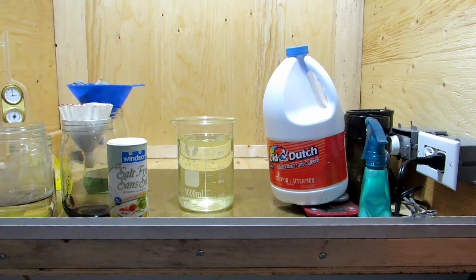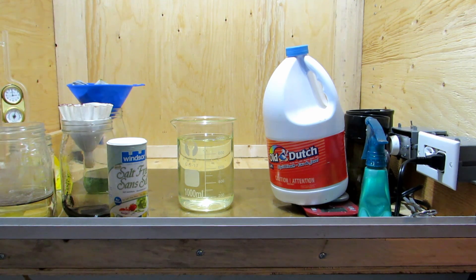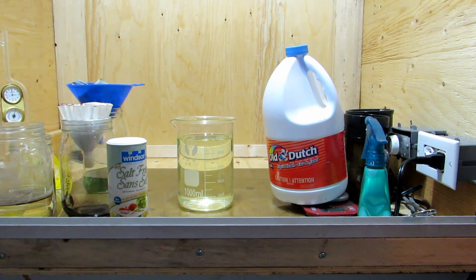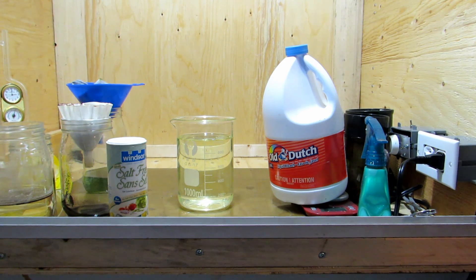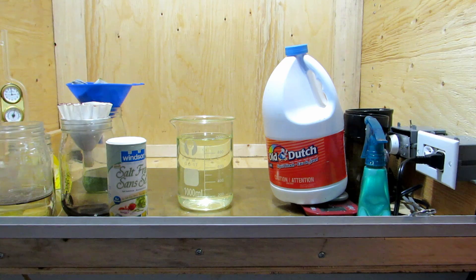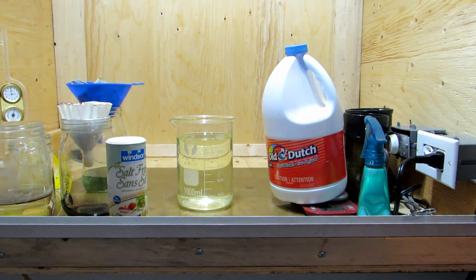Okay, hopefully it's not too noisy. I have my fume hood on now. So we have one liter of bleach here and we're going to have to boil it down.